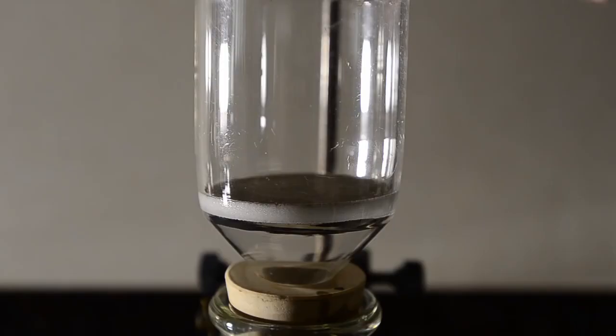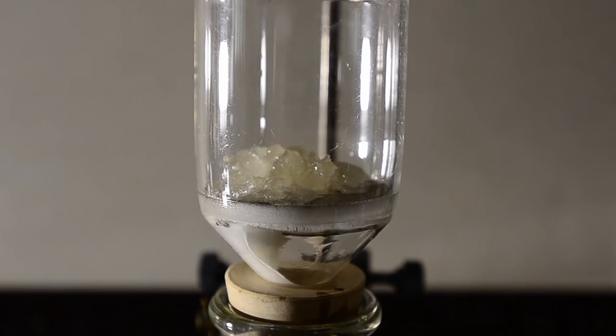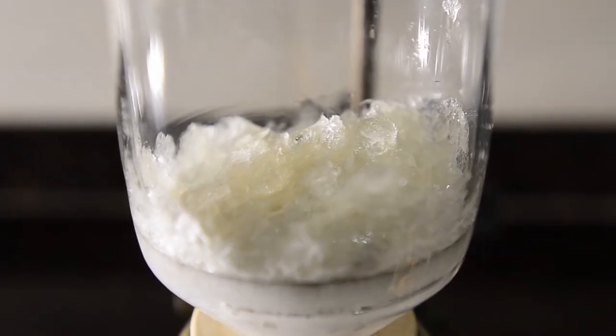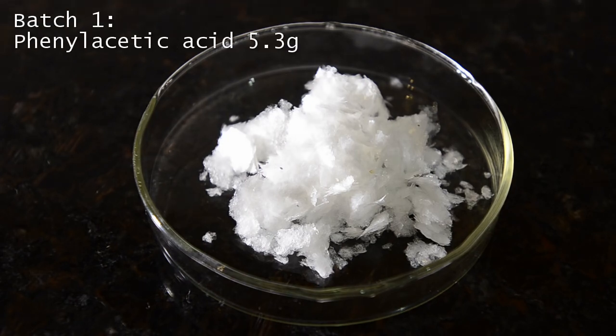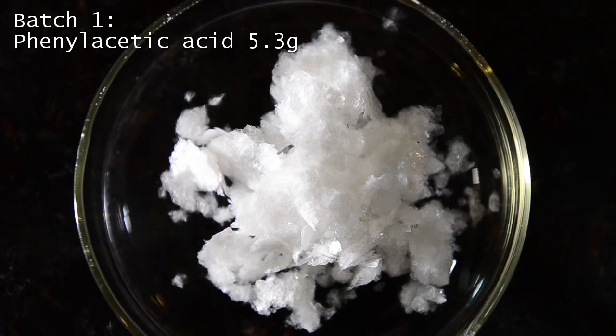So we got the contents of the flask into a funnel and filtered using vacuum to drive off all the liquid, and then washed with a small amount of ice-cold water. The water wash removed the yellow color of the crystal. Here's our first batch of product. 5.3 grams of phenylacetic acid crystals. They have a flaky appearance and a beautiful iridescence when light shines on them, a little bit like mother of pearl. The compound has an acacia aroma a bit like a rich sweet honey.